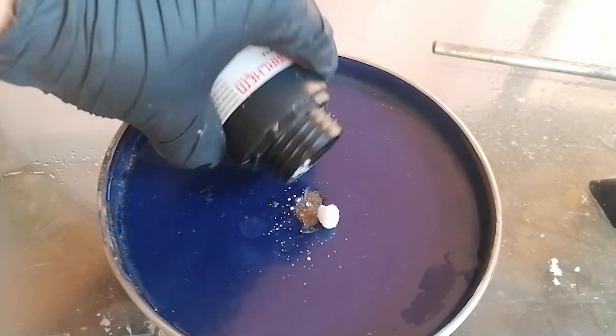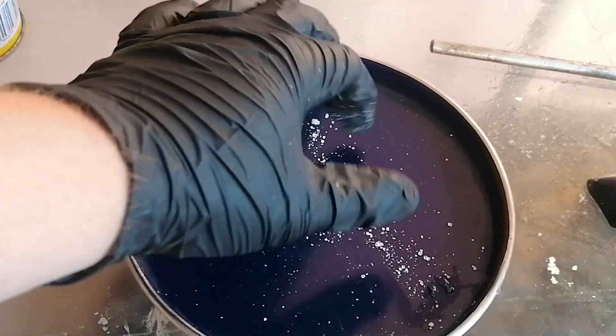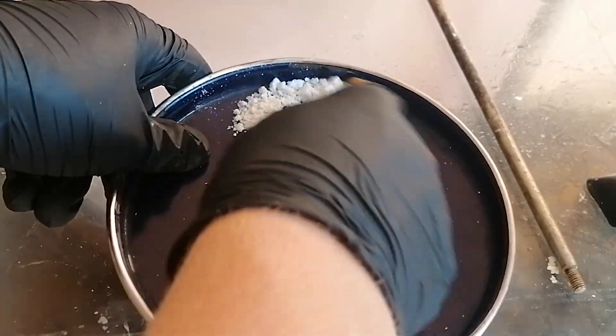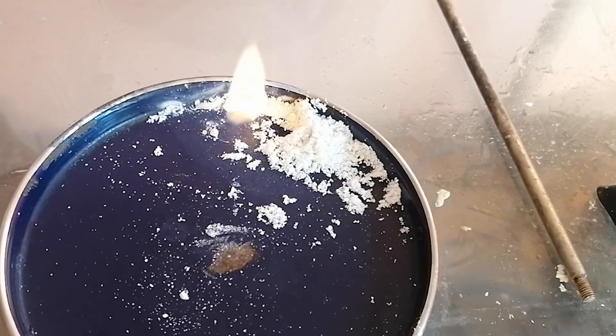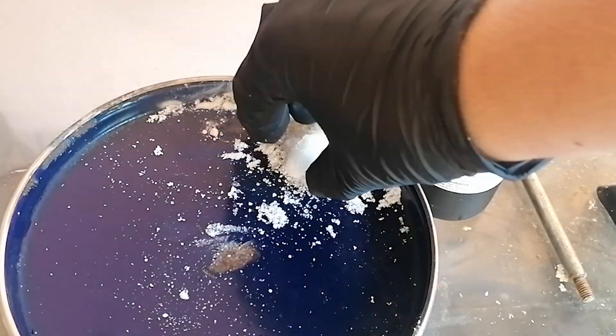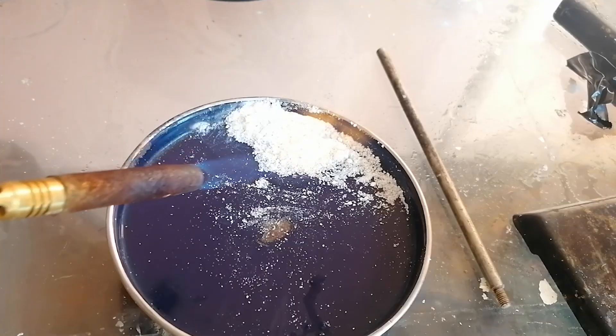This is some hexamine which I've stole from my black homie Frank and is the perfect fuel for the job. At first I've added way too much chlorate here. So I've added a little more hexamine. Anyway, here we go.